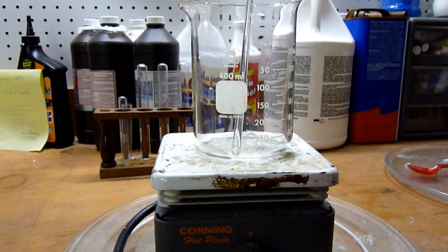Copper also forms many coordination compounds with lots of other anions so I'll demonstrate those in a few upcoming videos which will be kind of cool. I can isolate some copper complexes and things like that, maybe some amine complexes with ammonia.